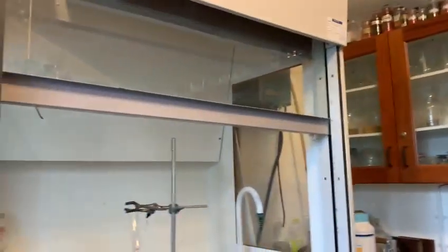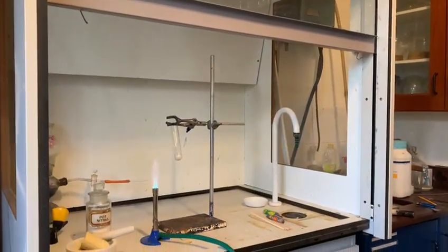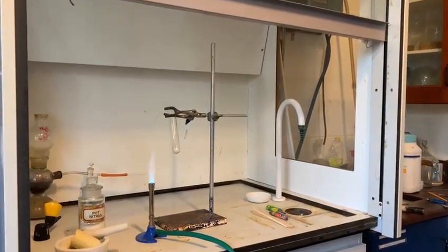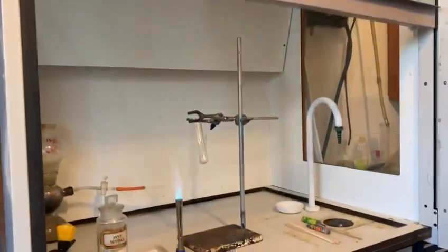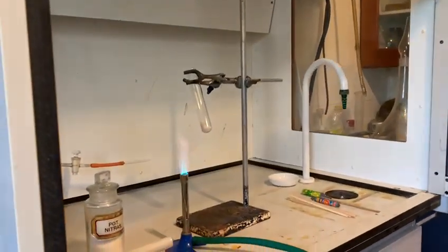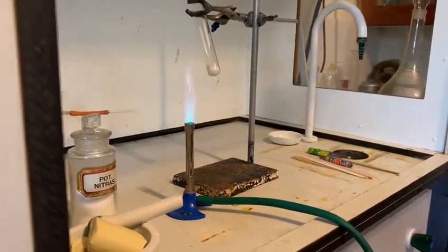Today I want to show off my newly commissioned fuming cupboard. It still needs plumbed out and proper gas and things, but I'll get doing that very soon and we'll be able to do lots of exciting experiments in the fume cupboard.